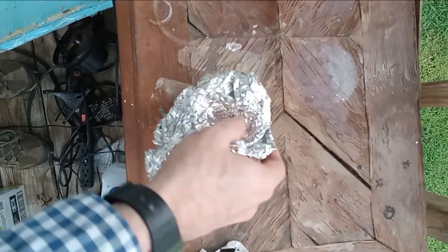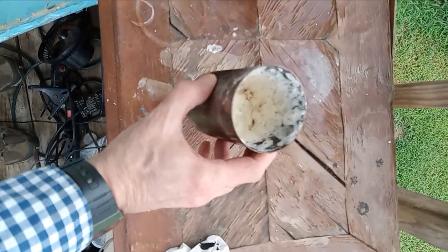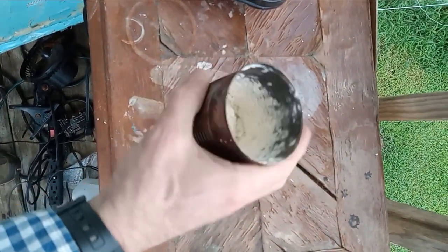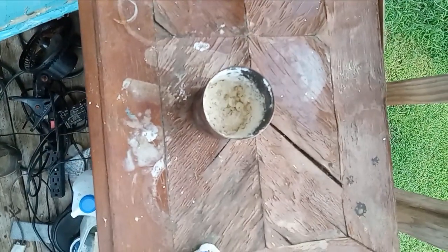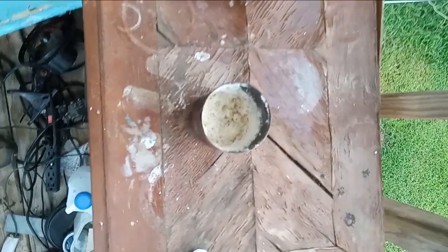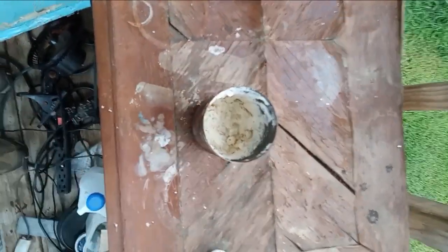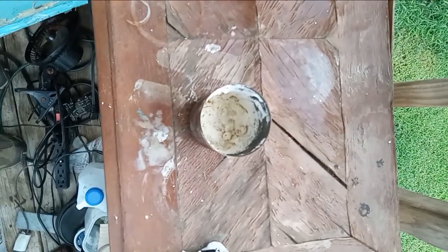Okay, so here's our calcium cyanate. Apologies for repeatedly saying cyanamide. That's the next step. I'm not going to show breaking this out of the container. It's not going to be too tough. But basically after this, you throw it in a fire, like a wood fire, charcoal, kiln, whatever, in a sealed container with a pinhole to allow CO2 to get out, but oxygen not to get in, and that'll take you to cyanamide.